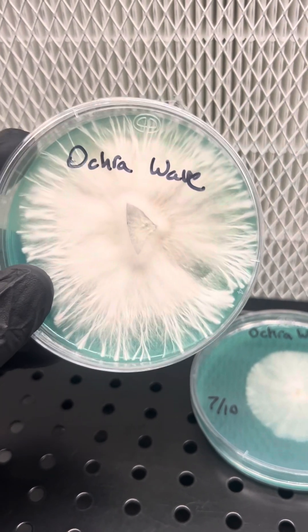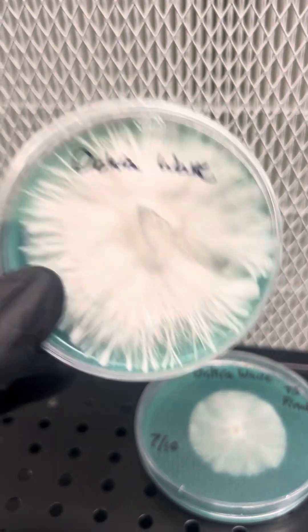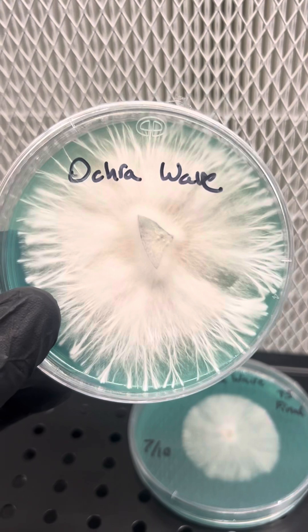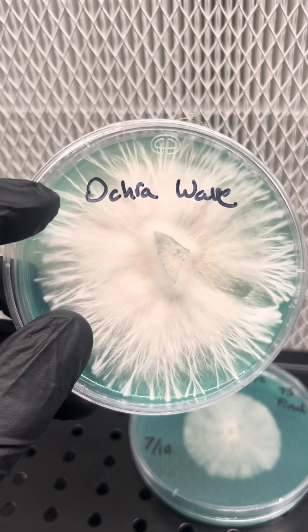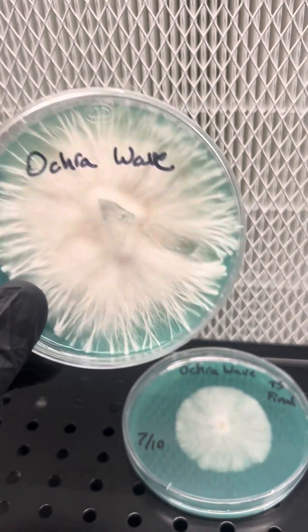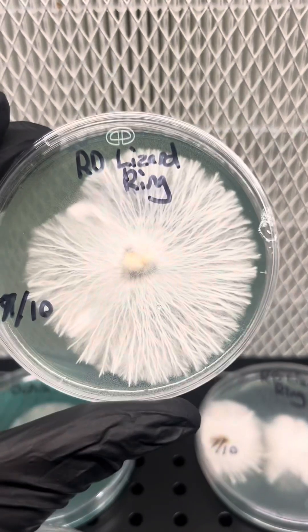But sometimes that's not enough. Because over time, I can transfer this over and over to new agar plates, I can change the agar recipe, I can take transfers of good growth — but all in all, it can lose its vigor and strength. That's where tissue samples play a huge part in bringing back cultures to make sure that they are strong and aggressive.